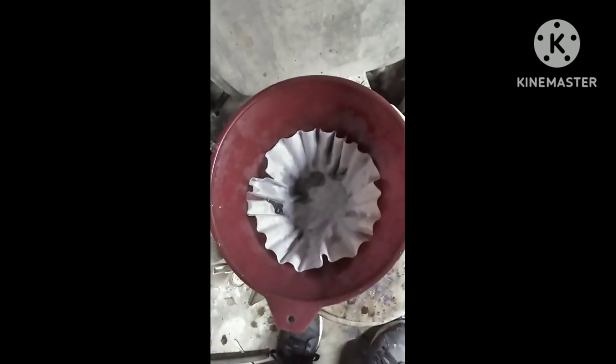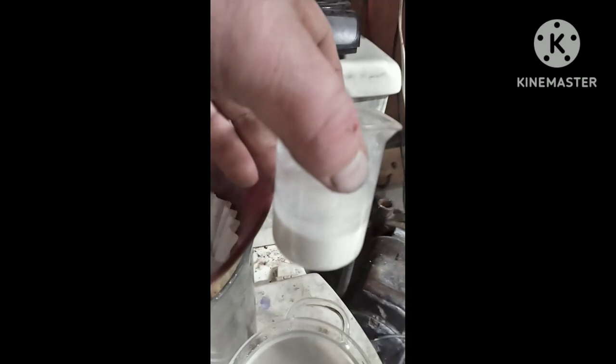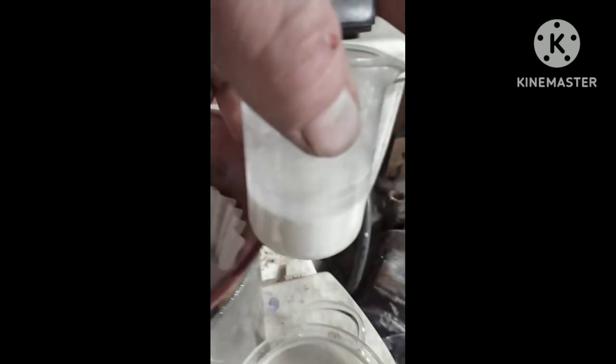Here's my solution. I'm going to decant this one last time and then run it through a filter. Oh man, that does not look good. I'll decant this and then filter it, and then we're going to start boiling it down. Filtering away — keep those puppies filtering. Well, I went ahead and filtered it again and it didn't really make any difference. Here's all the calcium that I pulled out. I'm going to filter this and then we'll do some tests on it to prove what it exactly is.